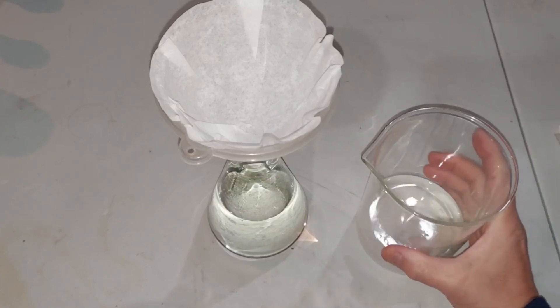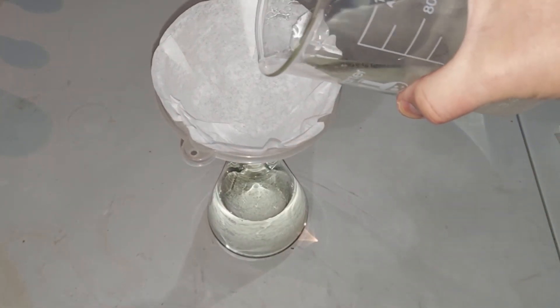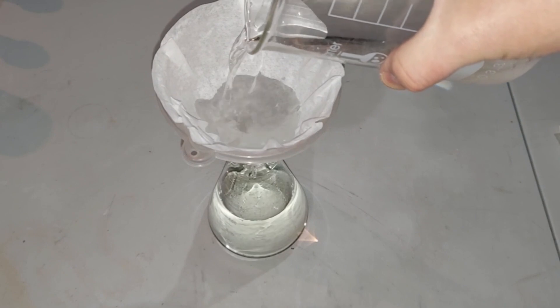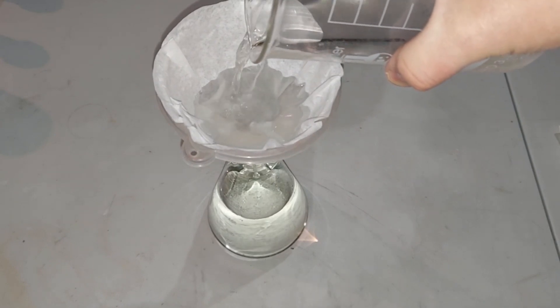Now that most of it's decanted, I can pour the rest of this in slowly and collect the crystals.